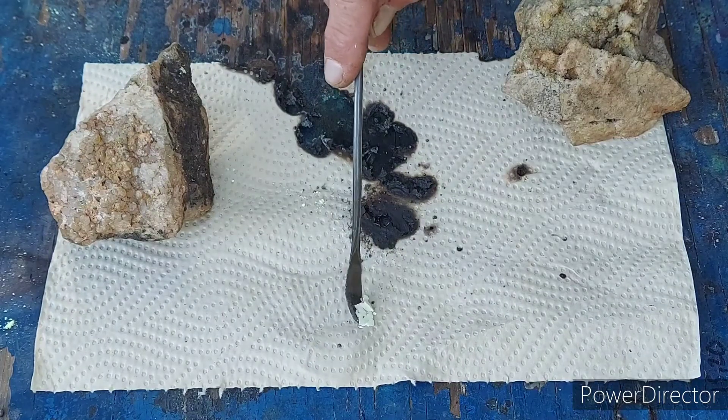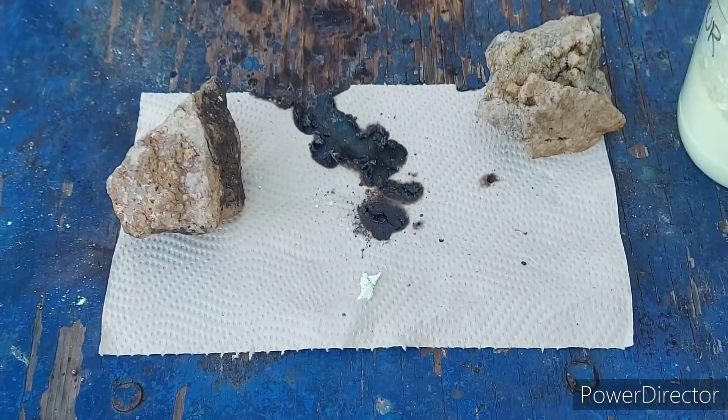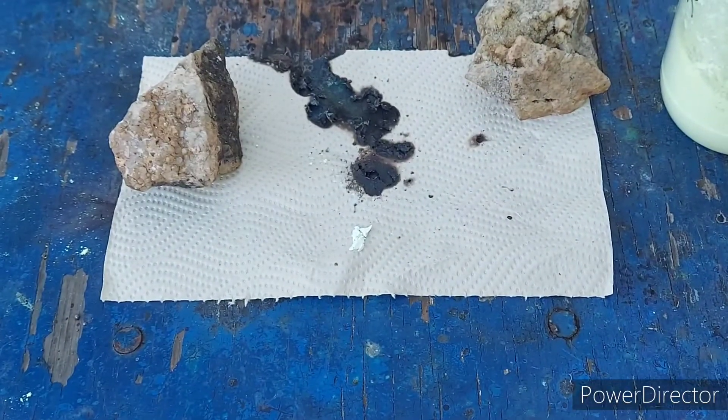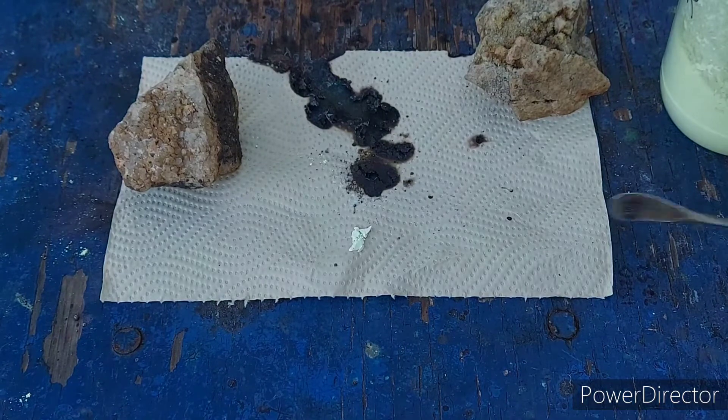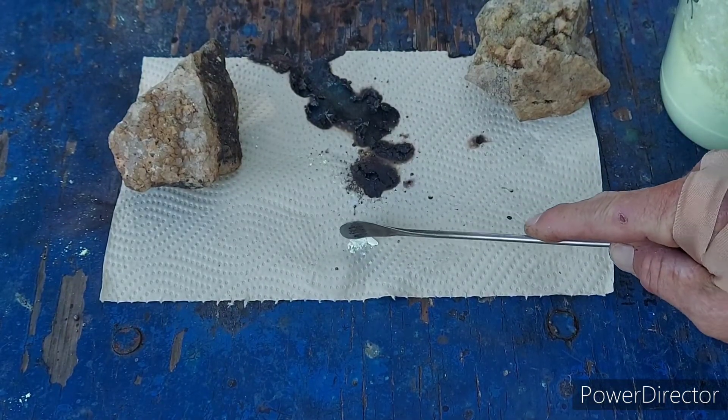Okay, let's mix them alright. You guys see all this? Let me move it back a little bit here, just because there isn't going to be much to see — it's all going to be over in an instant.